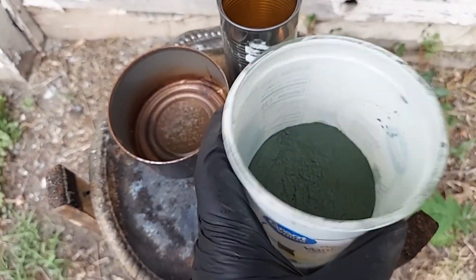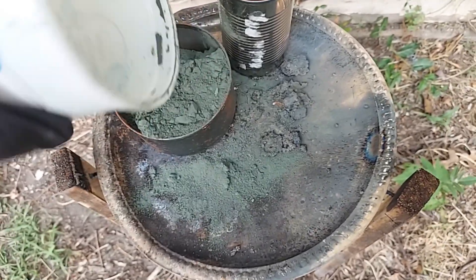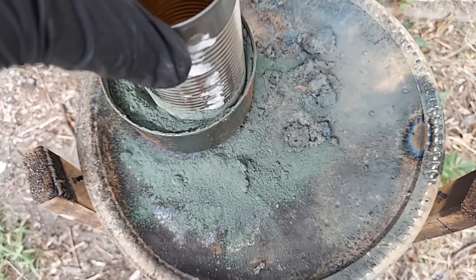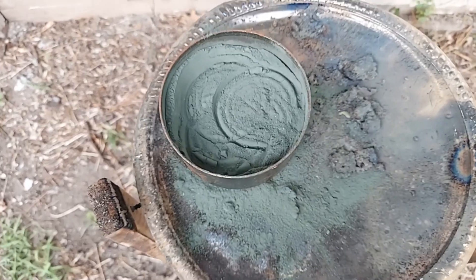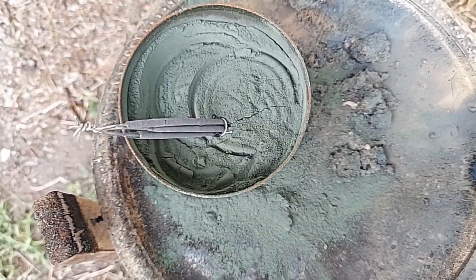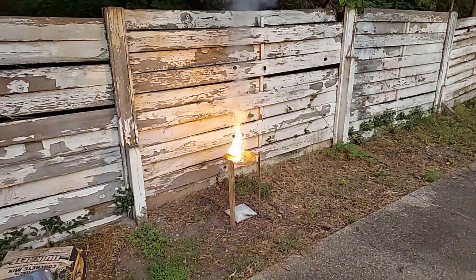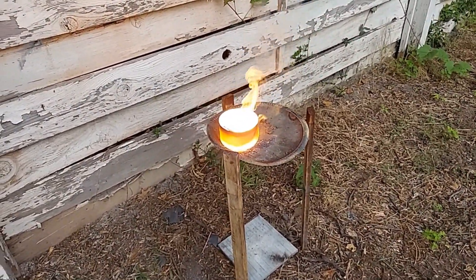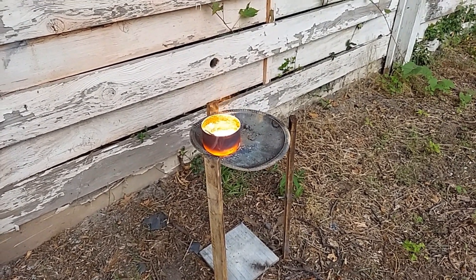Because this stuff is so hard to start, I'm going to pour it into a can — well, most of it landed in there — and then use an empty can to press it down. Placing the sparklers and lighting it. So much for being hard to start. It's glowing red hot, but it did not burn through the pan or the tin can.